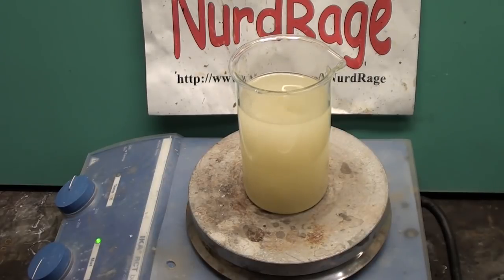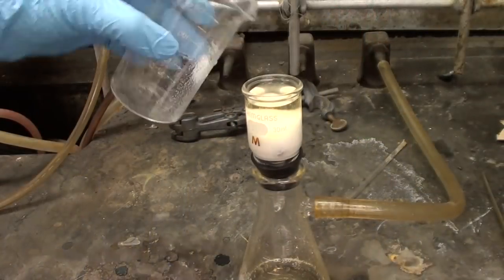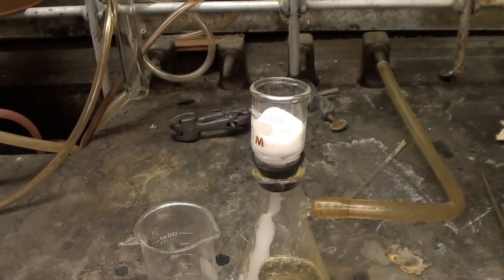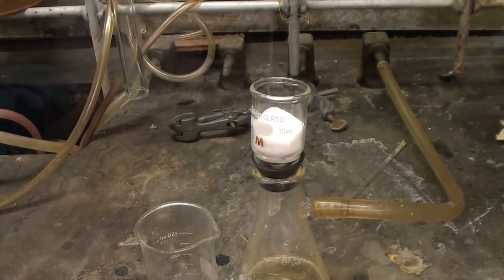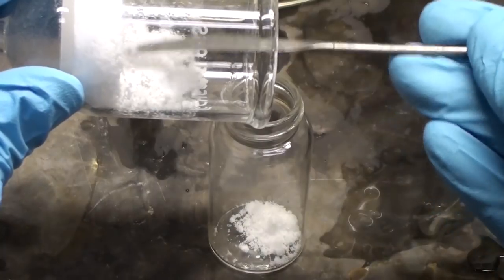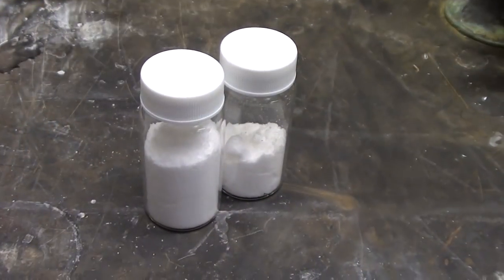Keep stirring until the solution cools down to room temperature on its own. This takes about an hour or so. Vacuum filter out the hydrazine sulfate and pull air through it for about an hour to dry it on the frit. Transfer hydrazine sulfate to a container and there you have it, pure hydrazine sulfate.